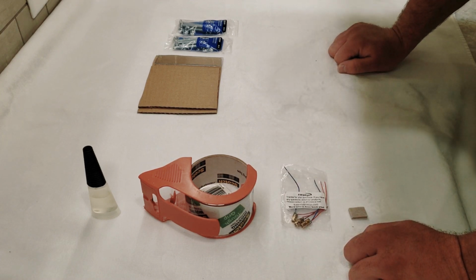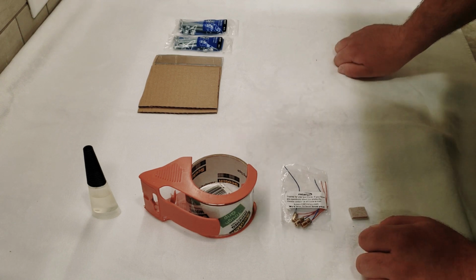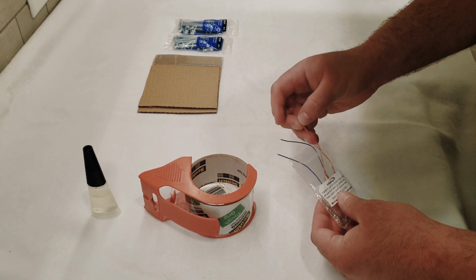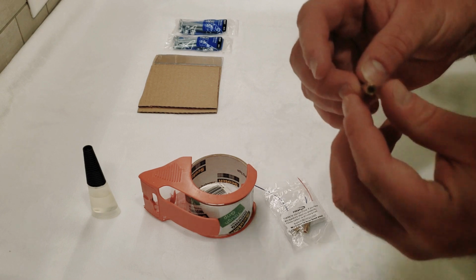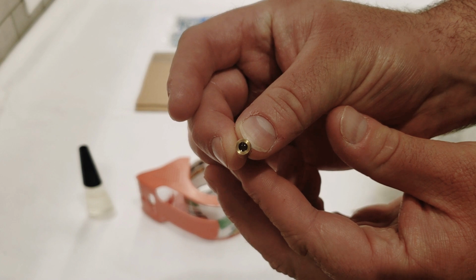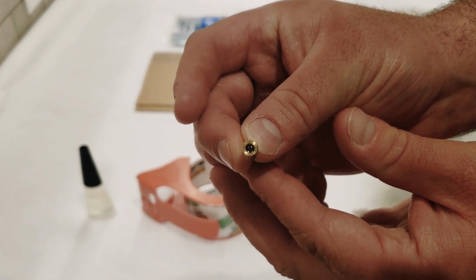As you can see, I've only got 3 left. I went through a couple iterations of this design before I found one that I think was the simplest and easiest to make. But that should be more than enough for our purposes. So I'm just going to take one out really quick. These ones I actually like quite a bit because they're a lot easier than a lot of the other diodes I dealt with. If you can see there in the front, there is a small lens, and that is what we're going to be trying to get out of them.